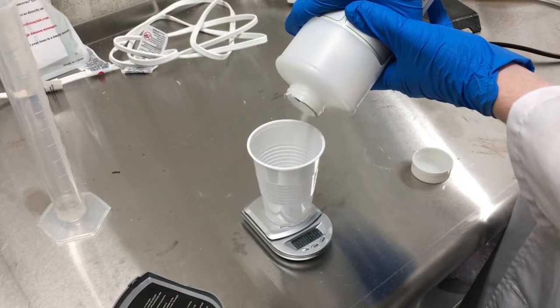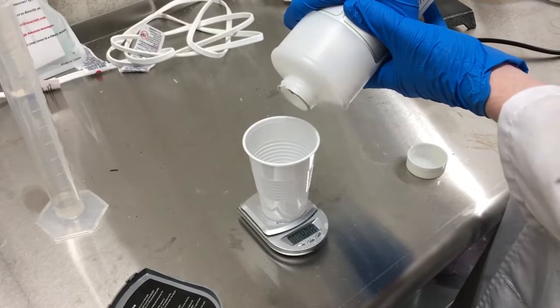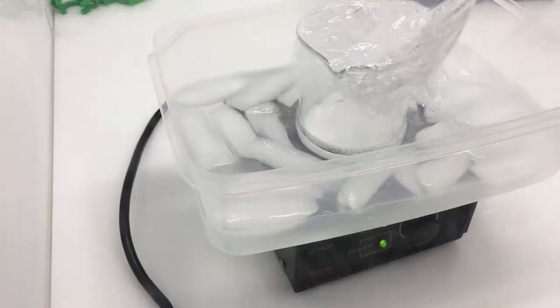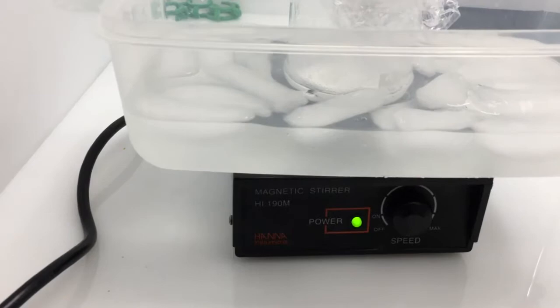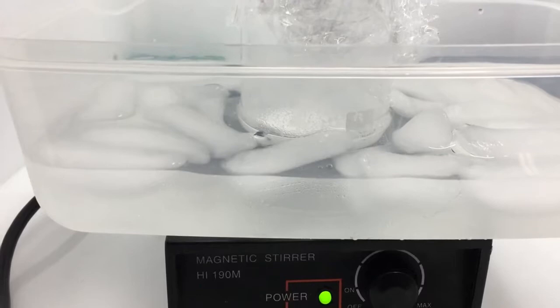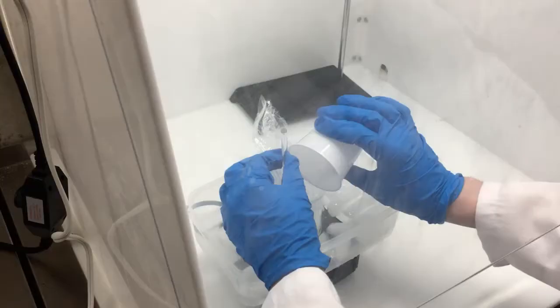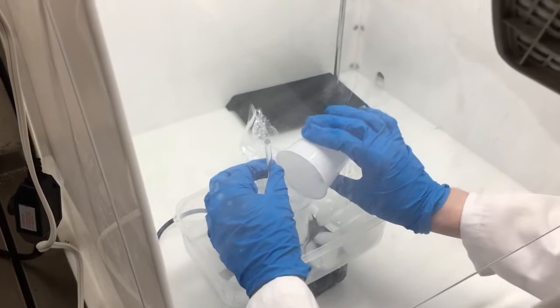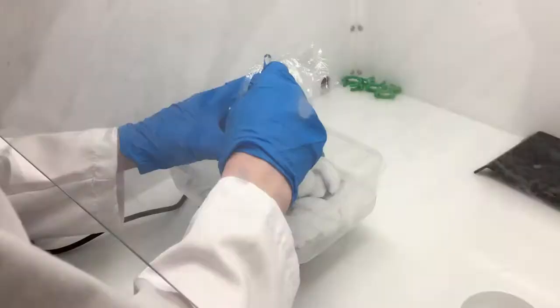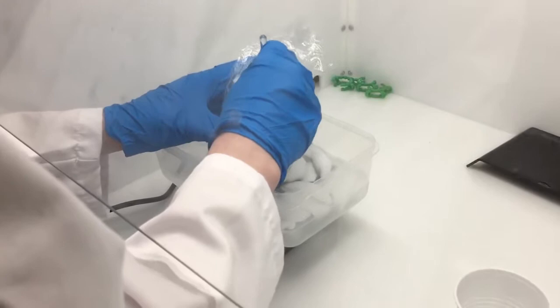You should add another 4.6 grams of sodium hydroxide into the hydrazine solution because most of the solid leftover is sodium bisulfate and it will make the ethanol layer easier to separate if we convert the sodium bisulfate into sodium sulfate. Once all of the sodium hydroxide has been added it is allowed to stir for another 10 minutes.